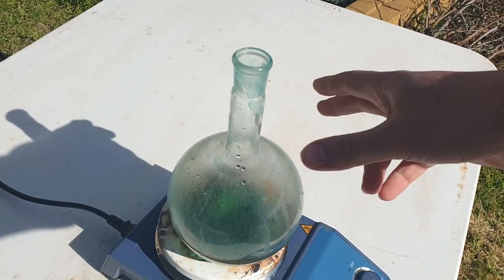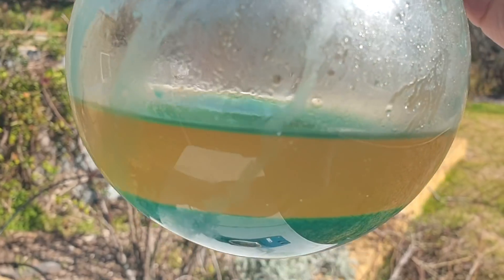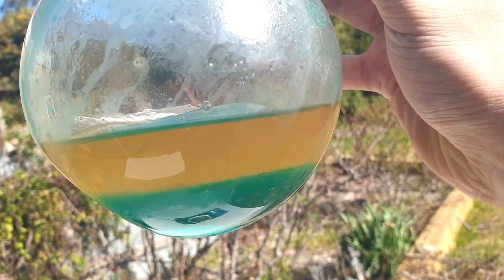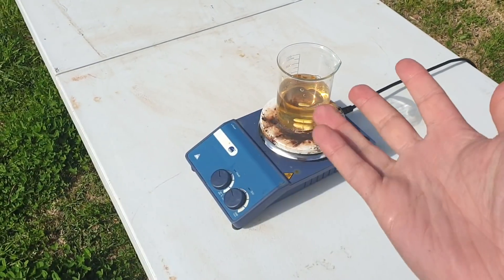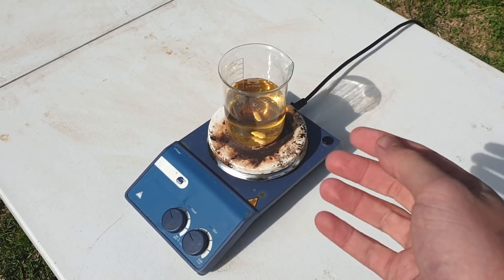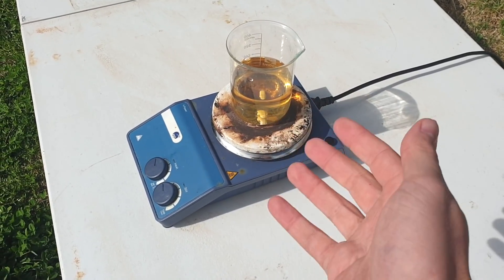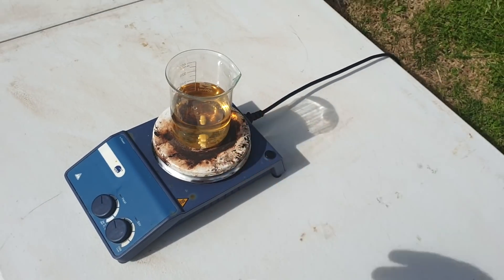After just 10 minutes of stirring with no heat, it's done exactly what I hoped — it's phase-separated with all the green going down to the bottom. So all that copper is now in the aqueous layer. The top layer just contains our naphthenic acid, and also the permethrin. If there were no permethrin in this it'd probably be done — just boil off the solvent. But we need to do an acid-base extraction. There's just too much solvent at the moment to deal with, and the sodium naphthenate still has quite high solubility in the organic solvent, so our recovery won't be great. It's gone really yellow — you know what, yellow chemistry every bloody video.